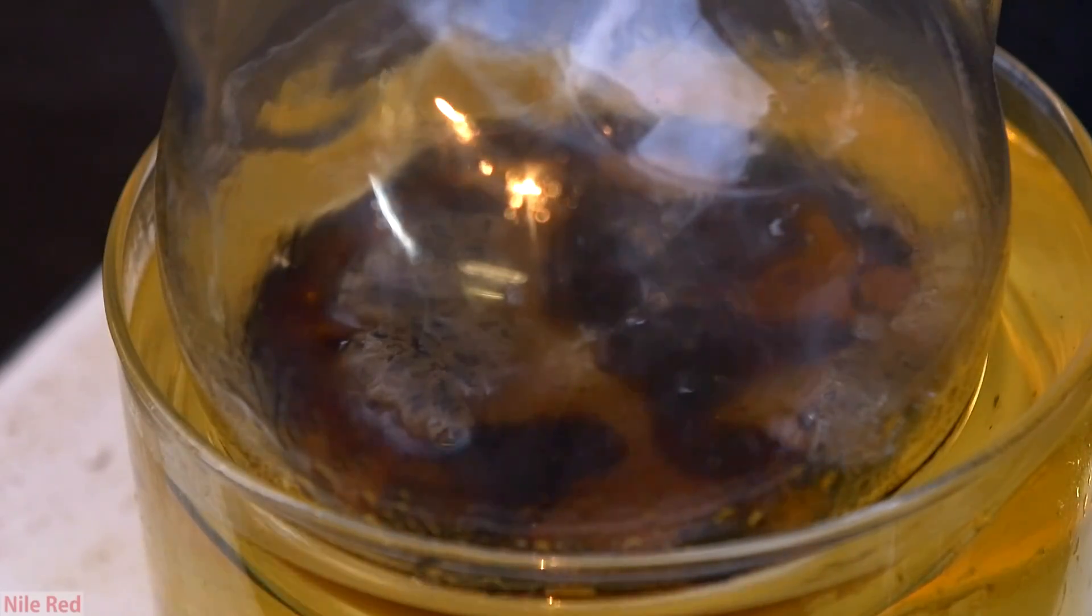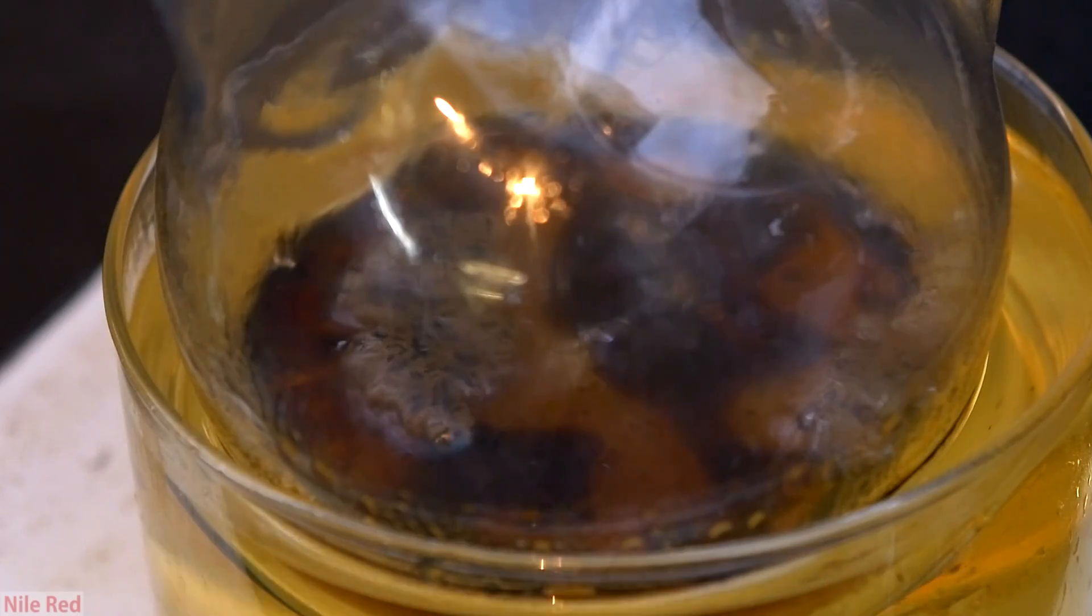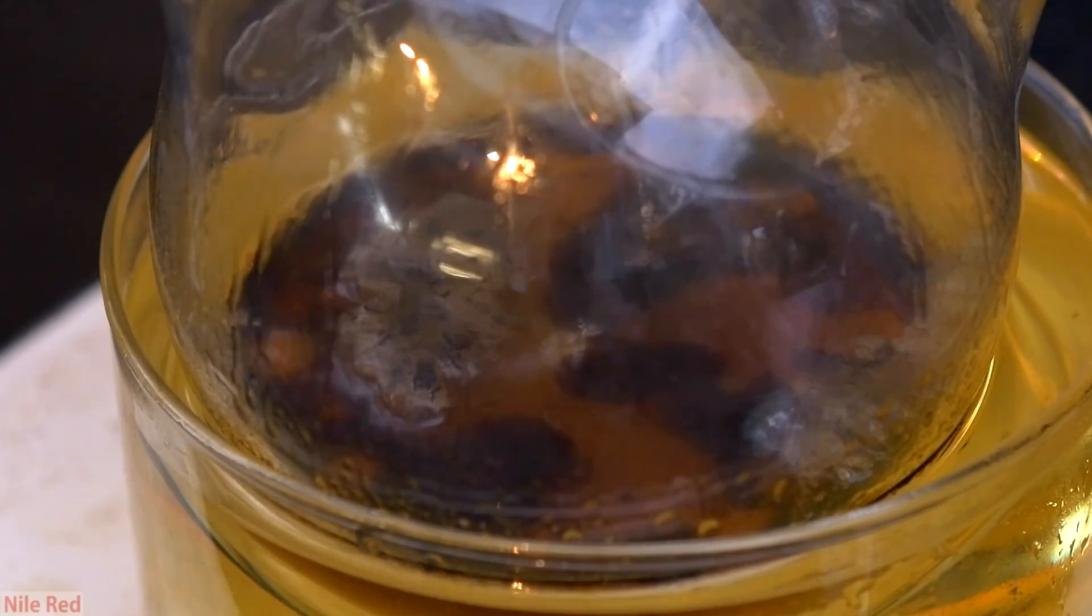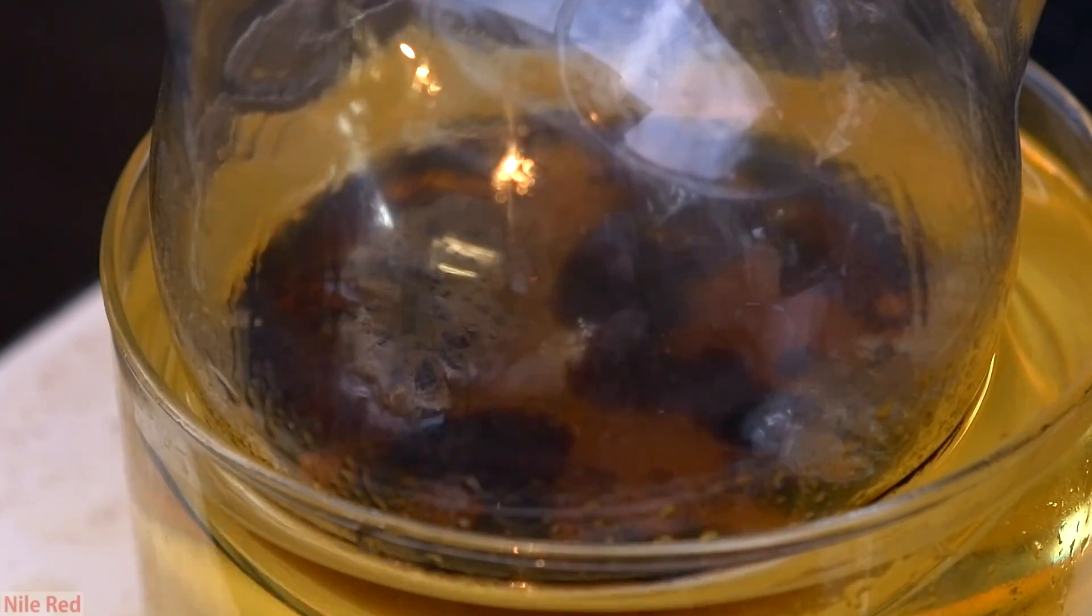If we didn't use this intermediate flask, this is what our final distillate would look like, and I wouldn't really be happy with it. Anyway, now that the reaction's done, I take the apparatus apart, and I do a little bit of a workup on the acrolein that we've collected.